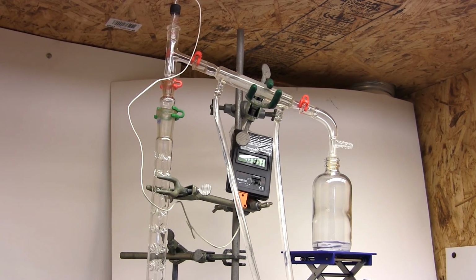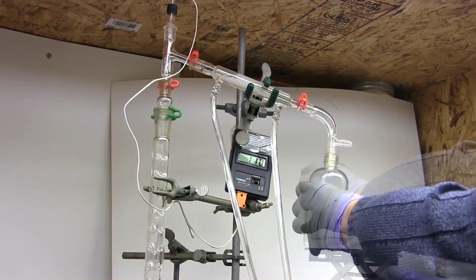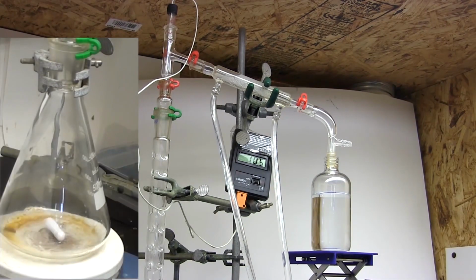I'm going to turn up the heat and just boil out this low boiling component even if I lose a bit of toluene. Okay, looks like we finally reached the boiling point of toluene and have boiled out all of the lower boiling components. The temperature seems stable, so this toluene should be pure. Let me change out the receiver, and now we're collecting pure toluene. And we are done.